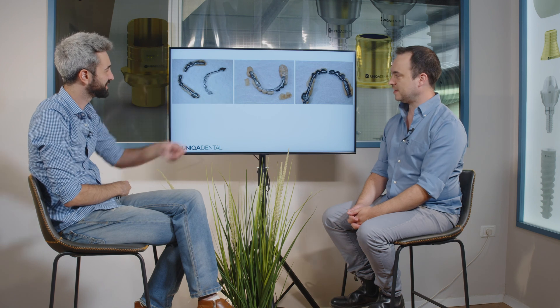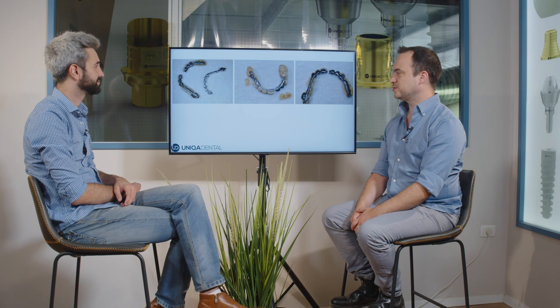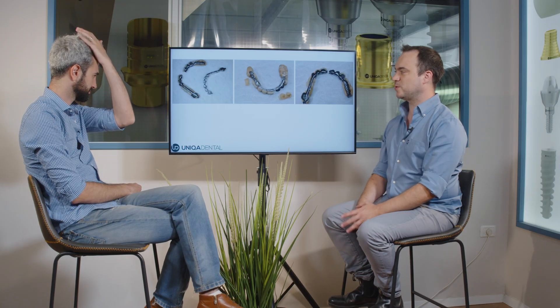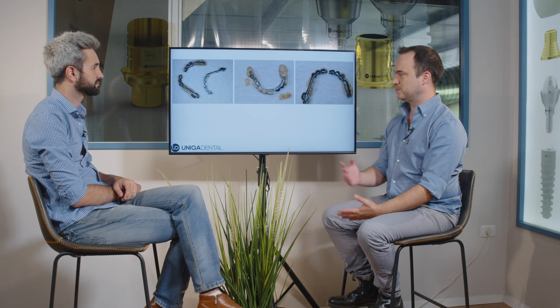The crowns even broke down? The reason they made this bar is because in those times it was a problem to connect implants and teeth. You couldn't do anything good when you had a couple of implants and a couple of teeth — you can't connect in a rigid way teeth and implants. You need some flexibility. So what they did, they made telescopic crowns on teeth and implants and a secondary structure on the teeth and implants.